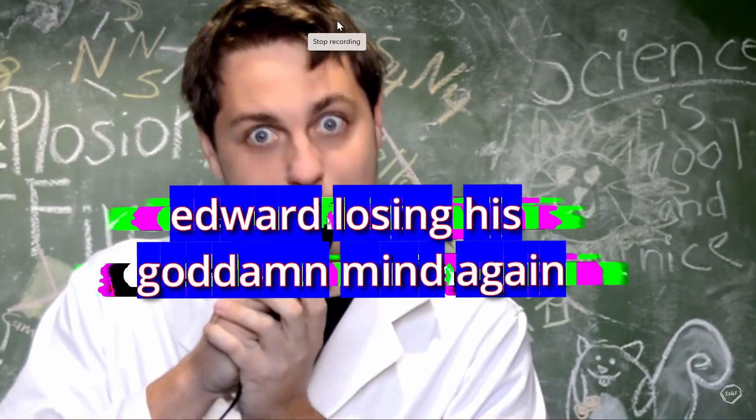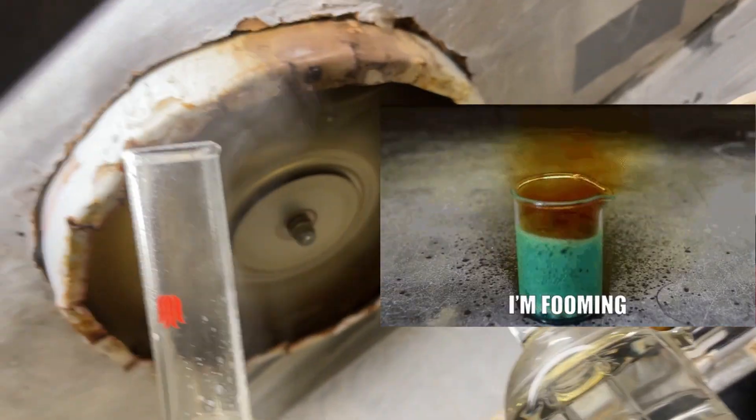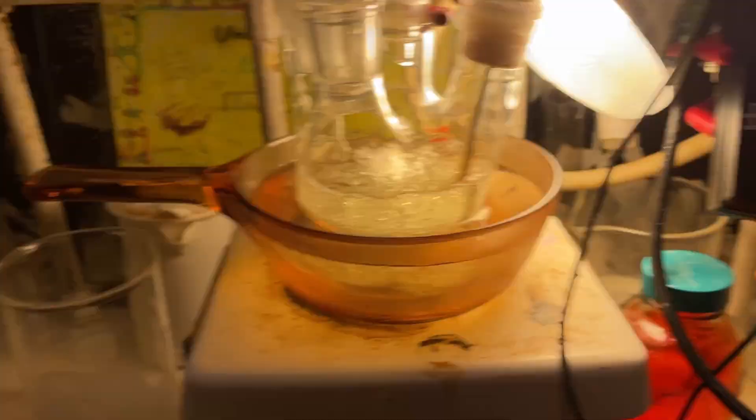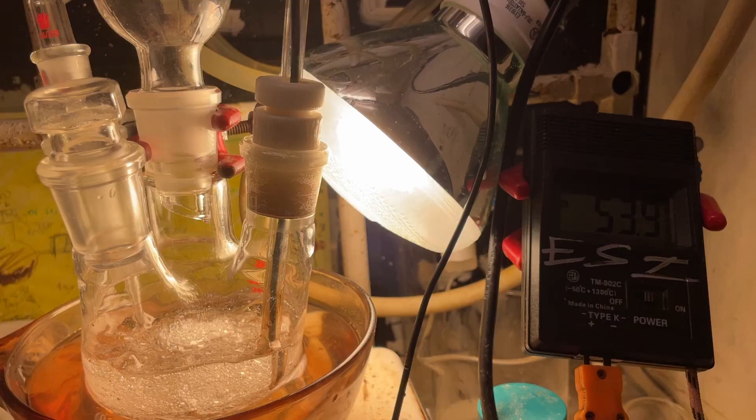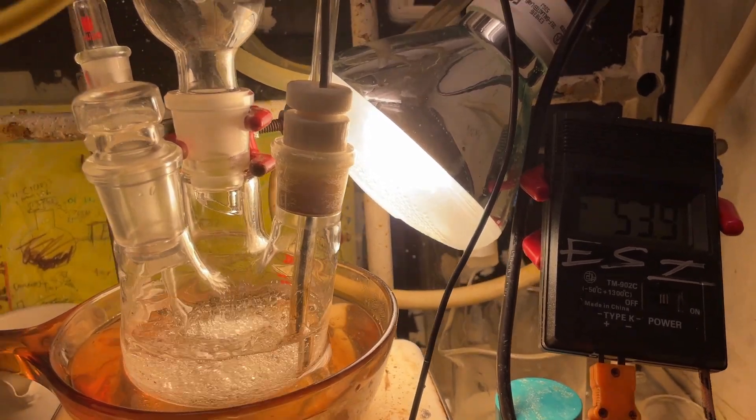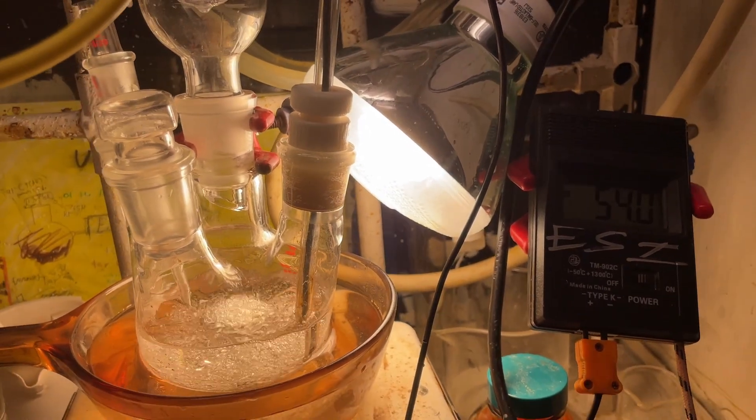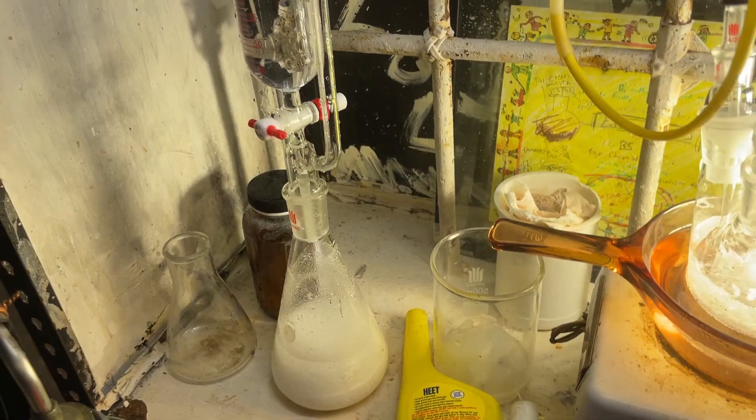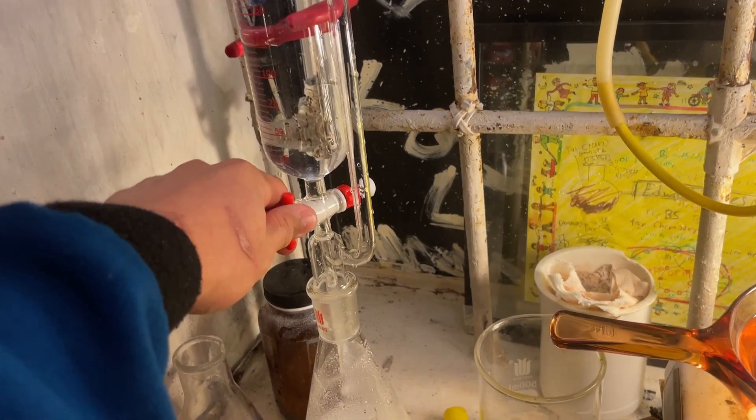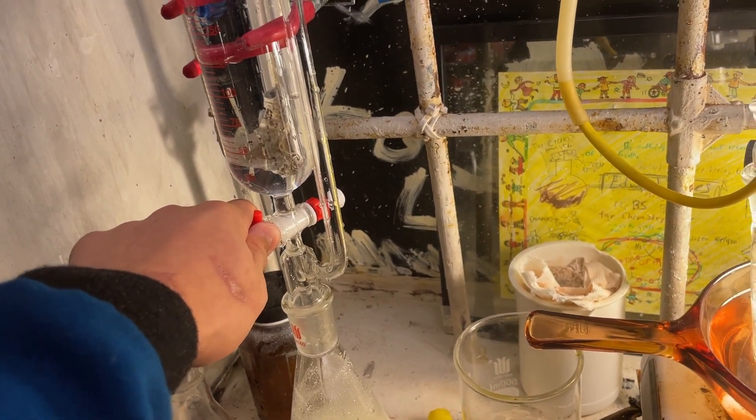F***ing synthesis nearly broke me. That's a lot of fuming. Yeah, starting chlorine generation. Hooray.